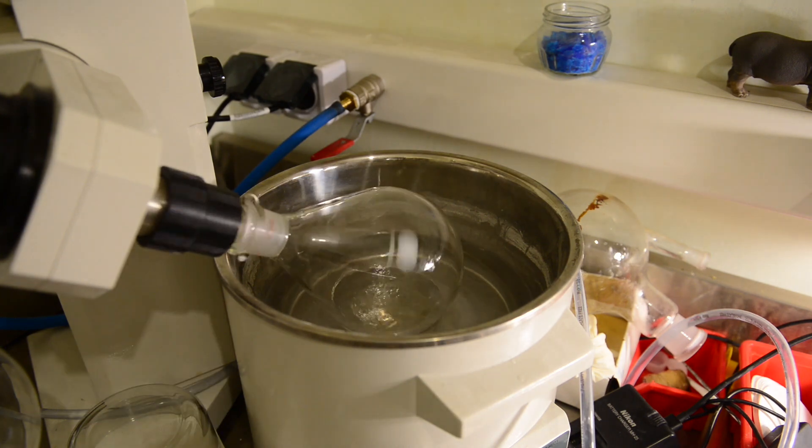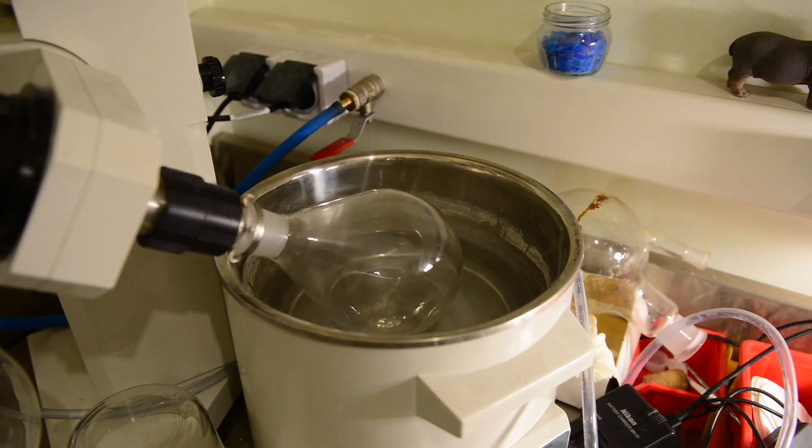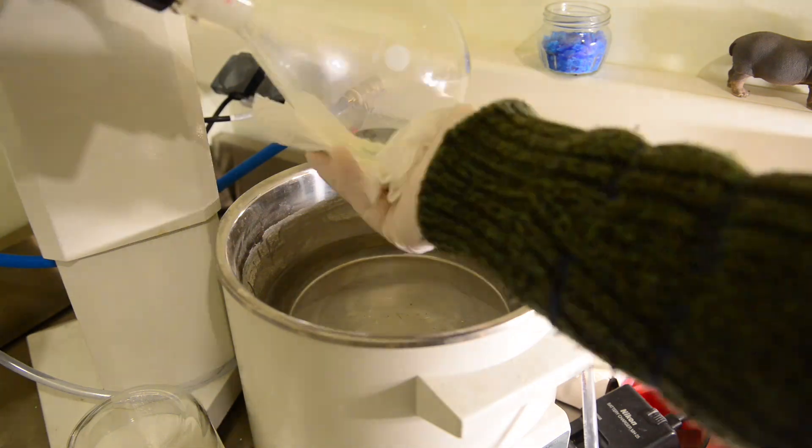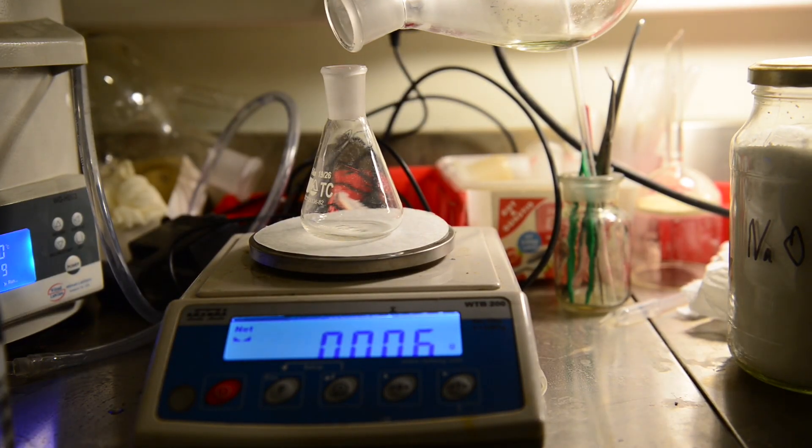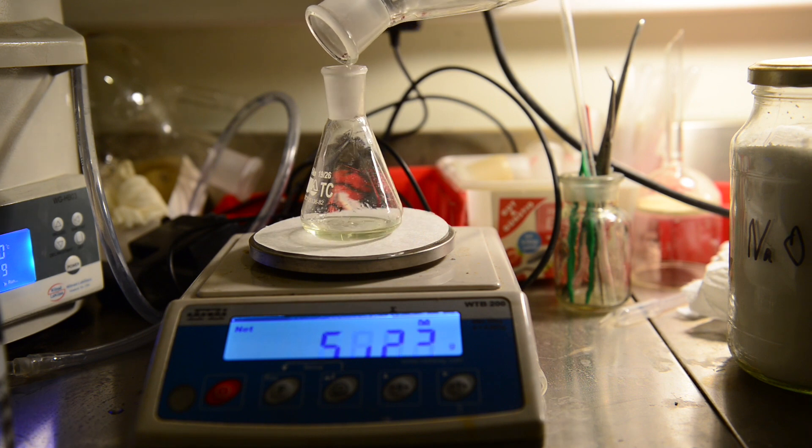The final yield is 9 grams again. This result is surprising and disappointing at the same time. We thought this time we had been less messy during the experiment and yield could have been improved. But we have got the same results.